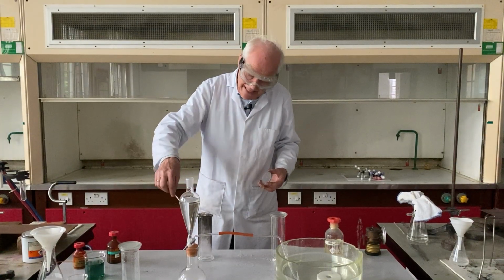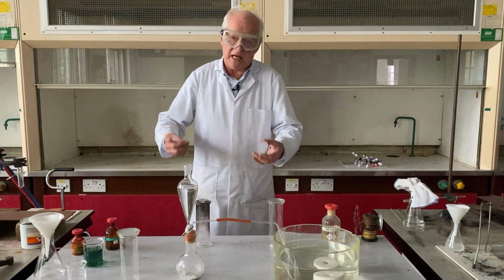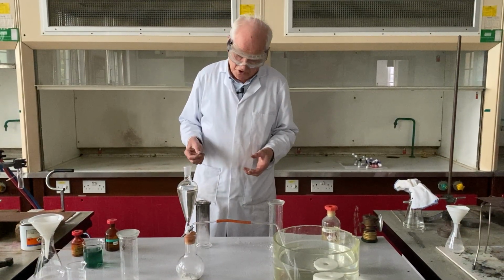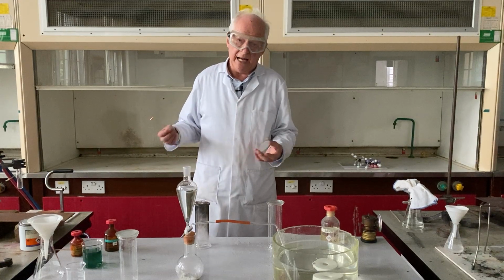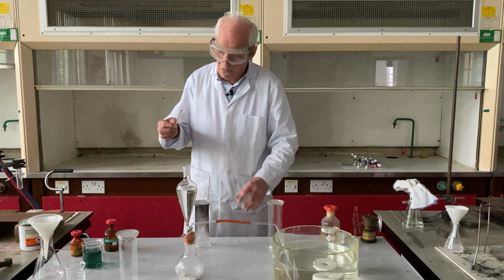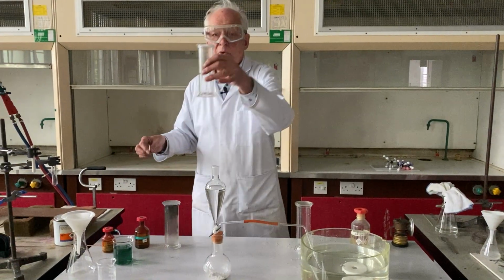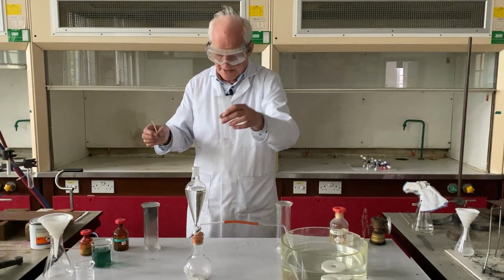So in the air which is around it, there is simply not enough oxygen to enable full combustion to take place, which is why we had this considerable amount of smokiness. Now, before we move on, let's move on now to this jar here, which only had 10% acetylene.